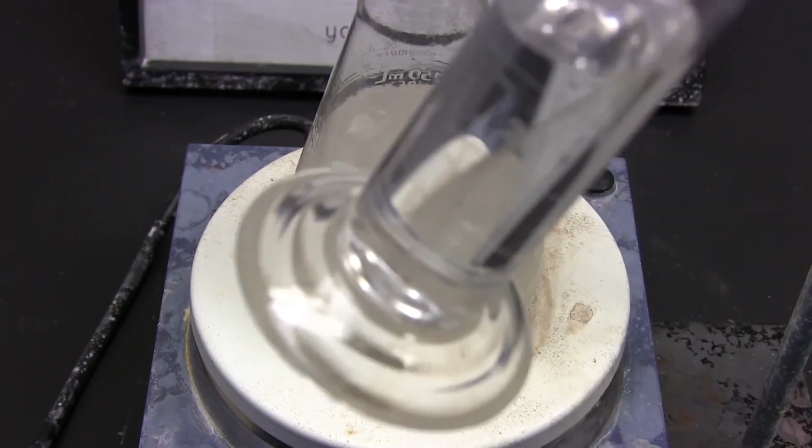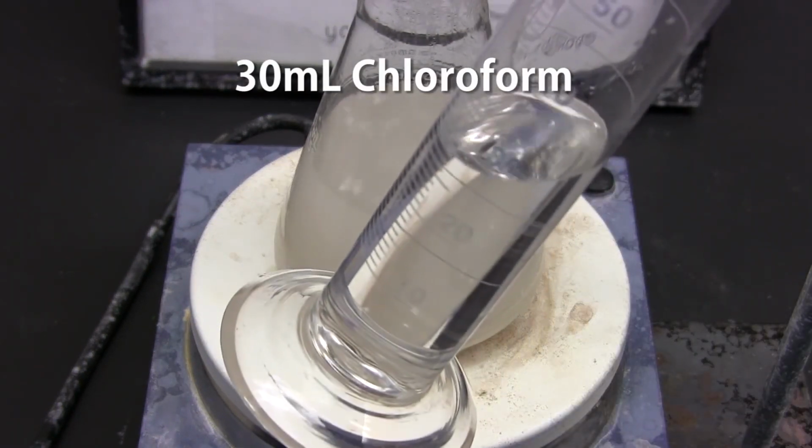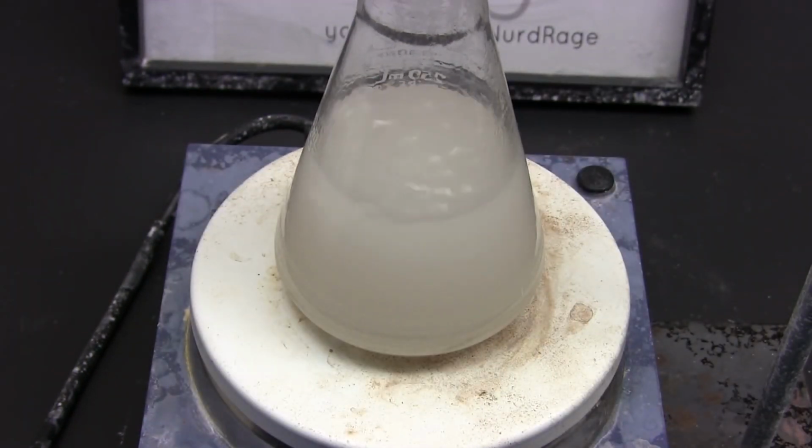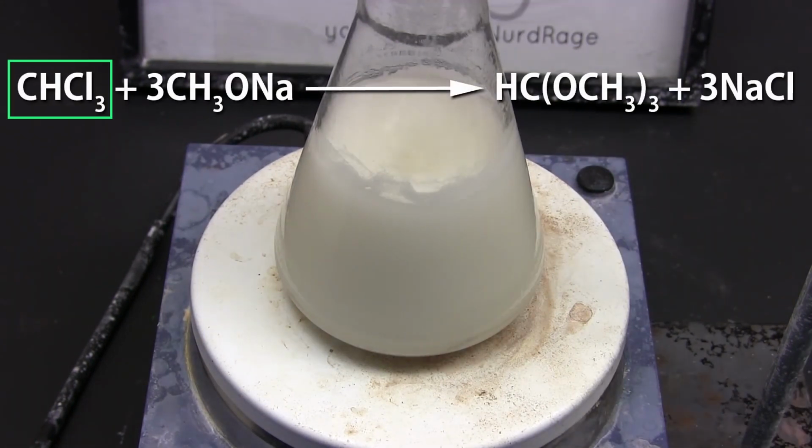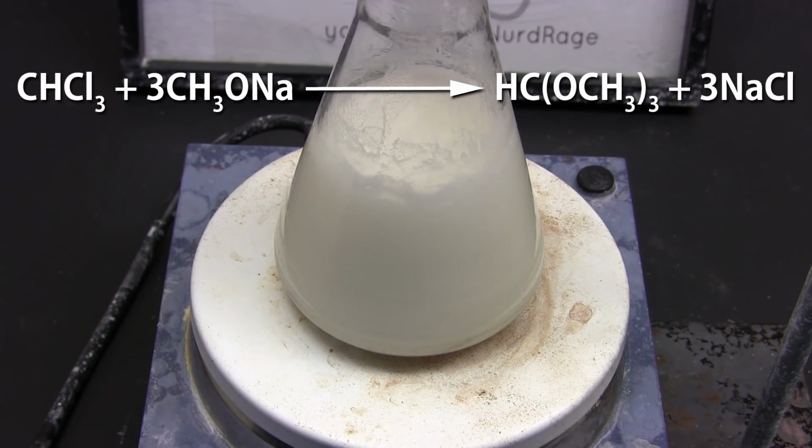When it starts refluxing, turn off the heating and get 30 milliliters of chloroform. Now add the chloroform 1 milliliter at a time through the top of the condenser to the hot sodium methoxide solution. Do not add it all at once or the reaction will go into thermal runaway. Add it at a rate to maintain constant reflux. The reaction is very exothermic and will boil quite vigorously with every addition. What's happening is the chloroform is reacting with sodium methoxide to produce Trimethyl Orthoformate and sodium chloride salt. The sodium chloride has low solubility in methanol and precipitates out as a white powder that you can see here.